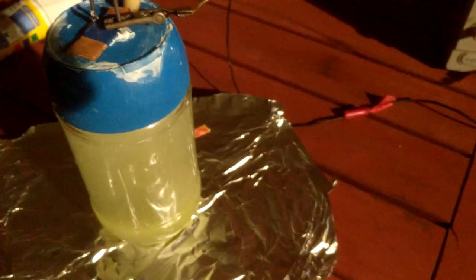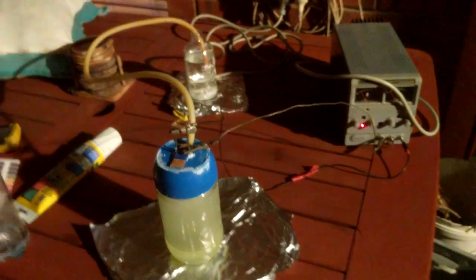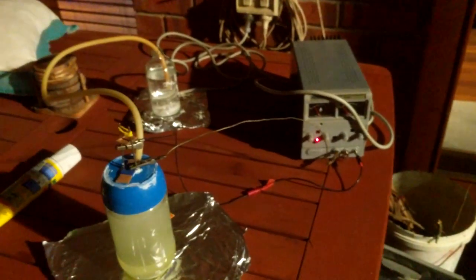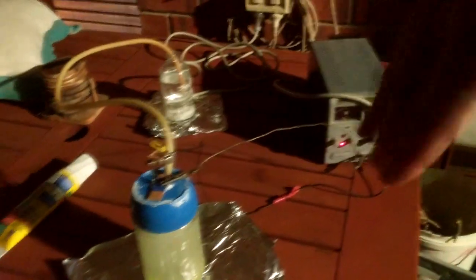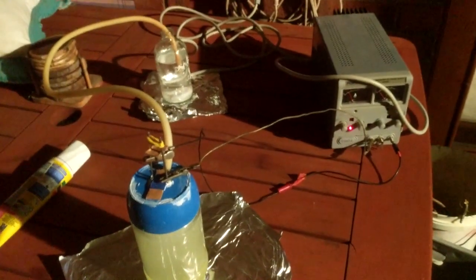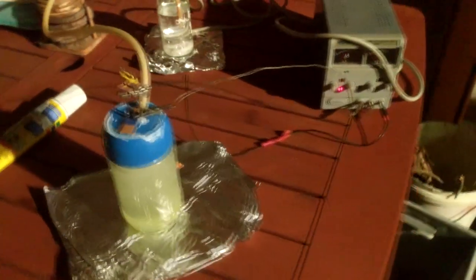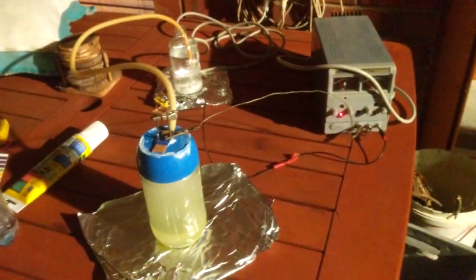I was a little too keen with the pH adjustment and it got acidic very quickly — I definitely overestimated how much hydrochloric acid was needed. So I'm just going to let that be; it's a minor issue and hopefully the electrodes will do fine. It's just a bit acidic at around pH 4 when it should be about 6, so hopefully everything's still fine. Electrochemistry is a bit over my head a lot of the time, so I'm just going to go to bed and let this run.